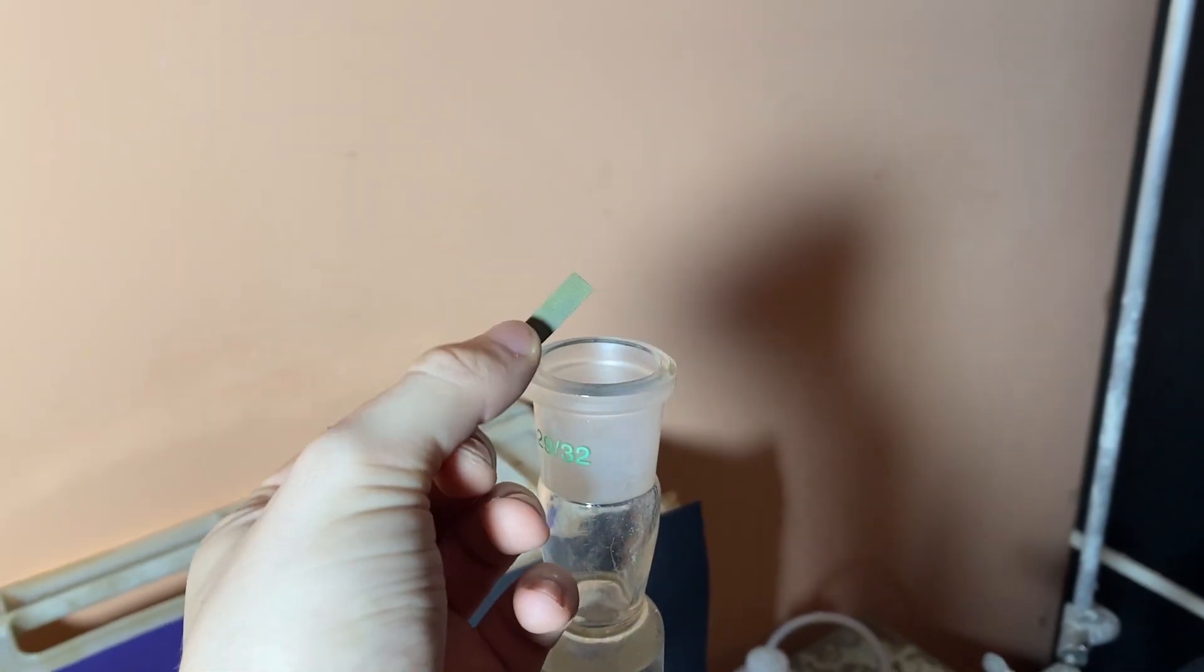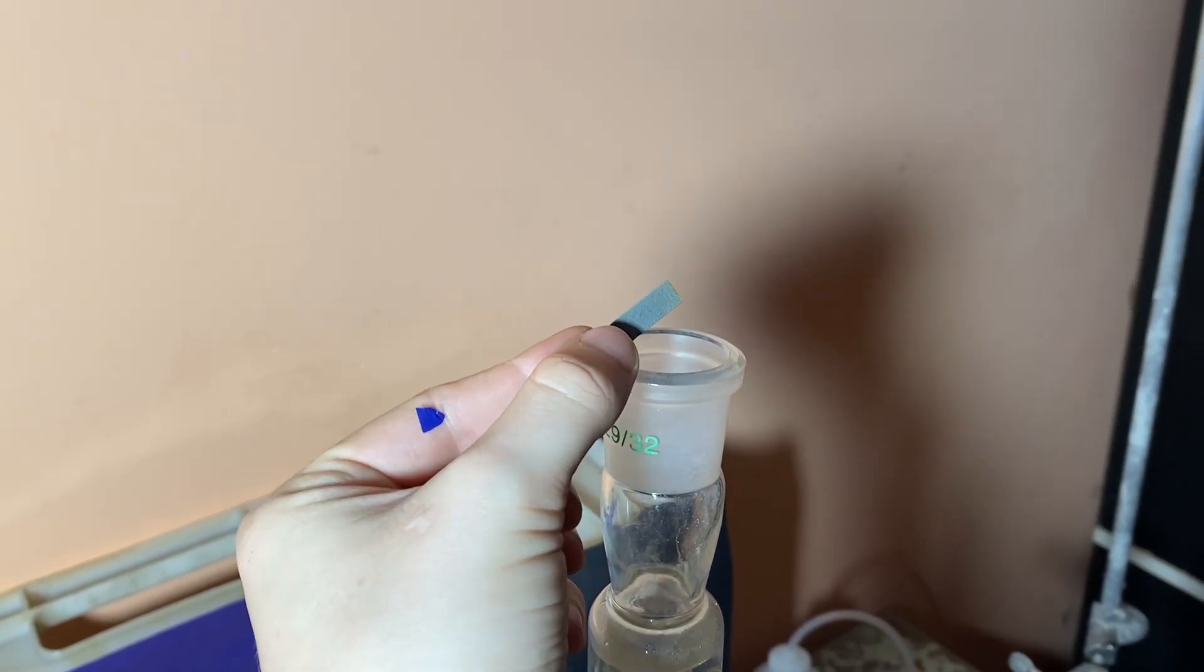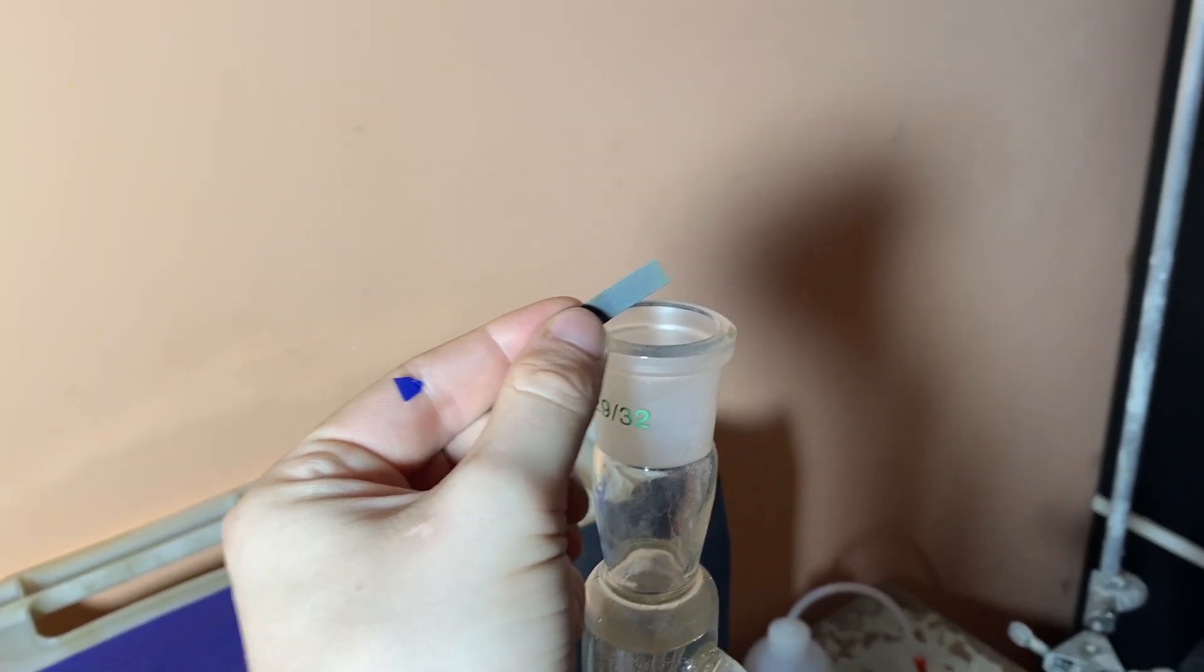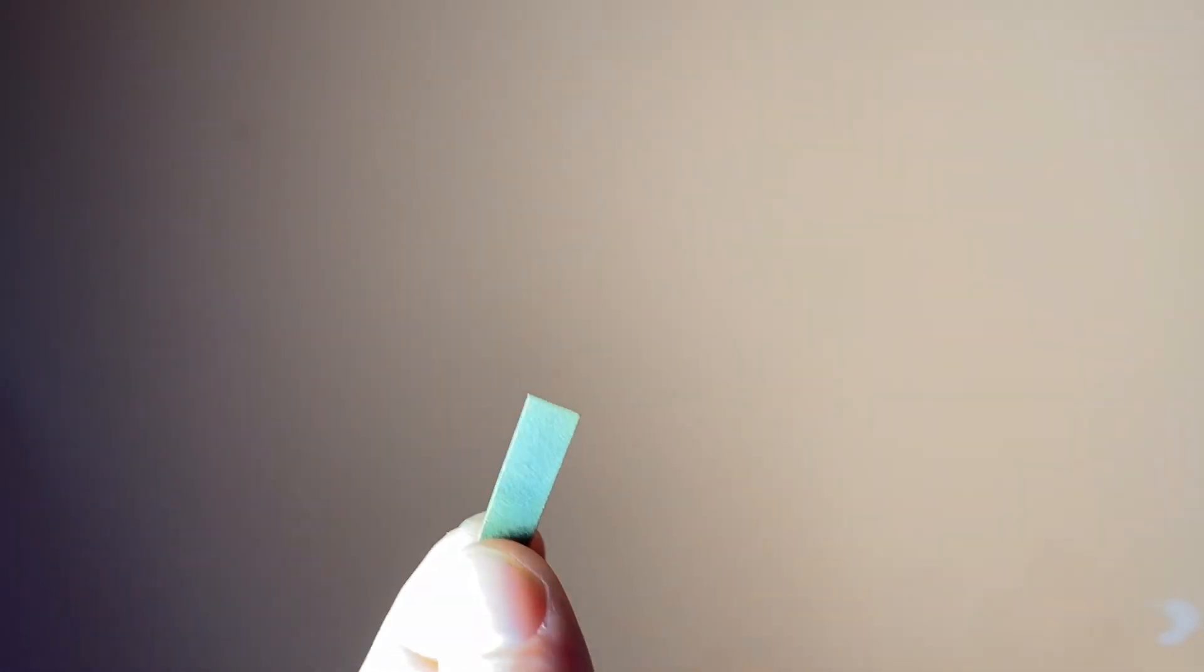To prove the presence of ammonia, I've lowered wet pH paper into the condenser. At first the pH paper starts turning green and then it turns purple, which means the water on the paper absorbed ammonia gas and it turned alkaline.